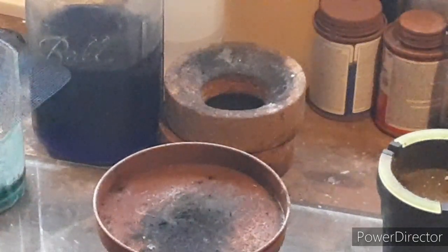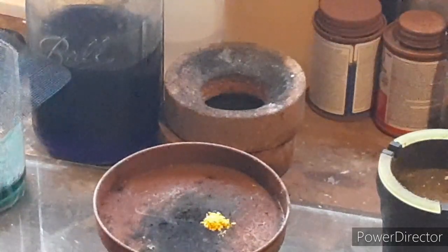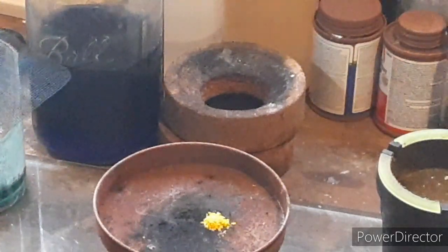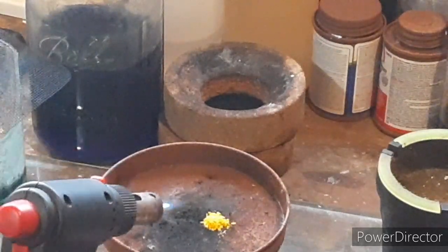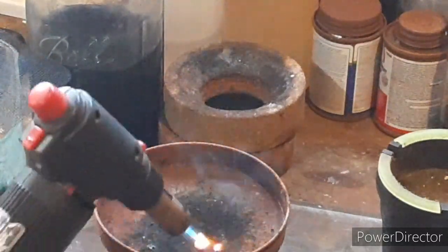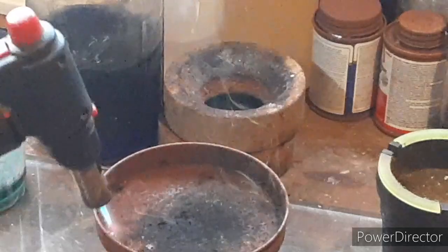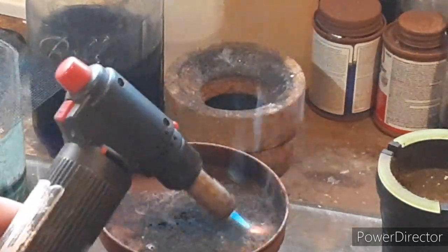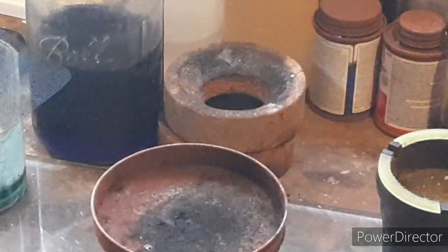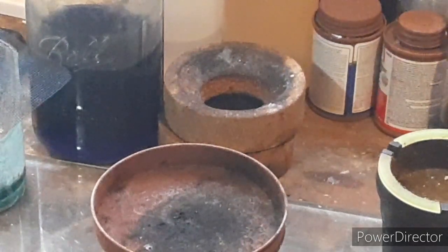It should perform pretty much the same. Fortunately, it's very cold out right now so my little piece of metal is cooling down pretty rapidly. Obviously, you don't just want to go throwing energetic materials onto a hot metal surface, so got to be careful of that. Alright, direct flame. And you see how fast that just reacts. There's a little bit left over here burning away, and as you can see, this stuff does not burn cleanly whatsoever — it leaves a lot of carbon behind. Trying to burn off all the residue. Let me clip these little confined pieces up and we'll try a little confined test to compare.